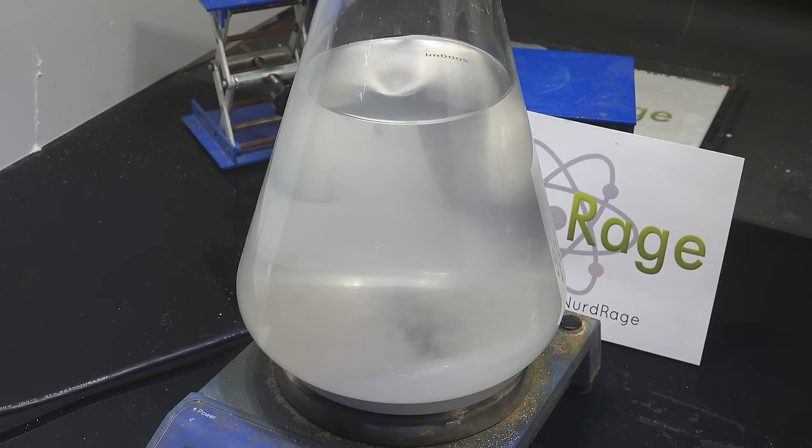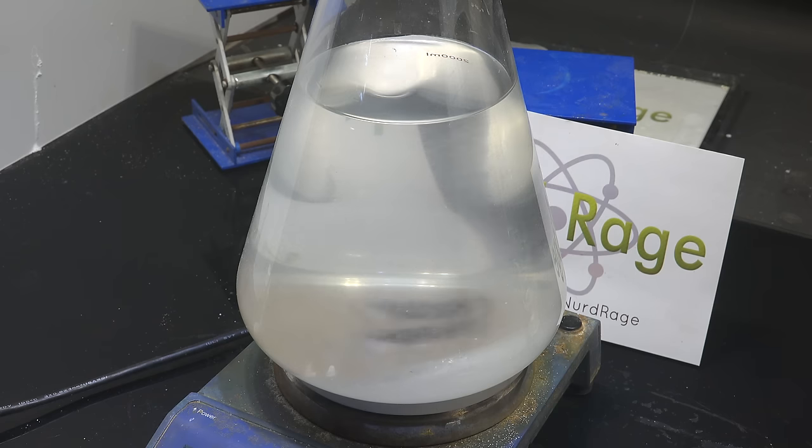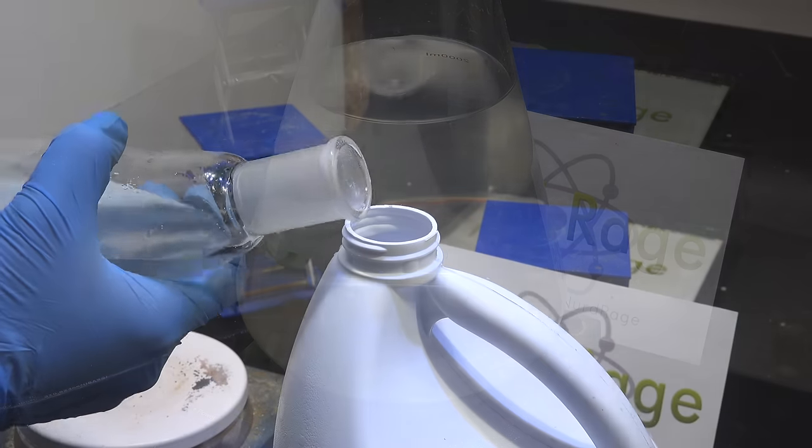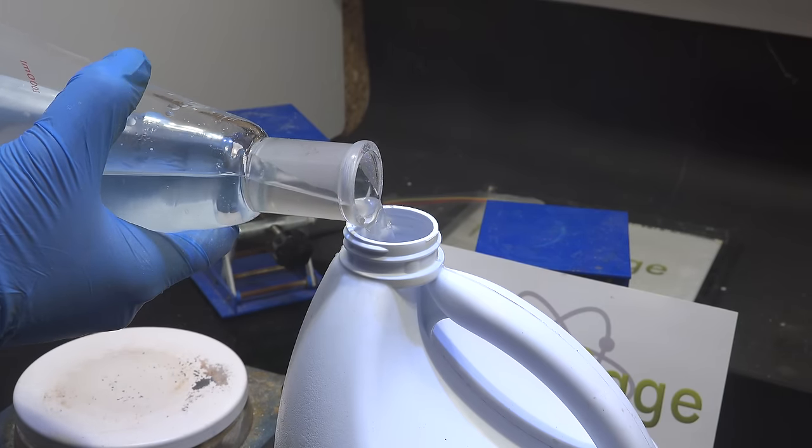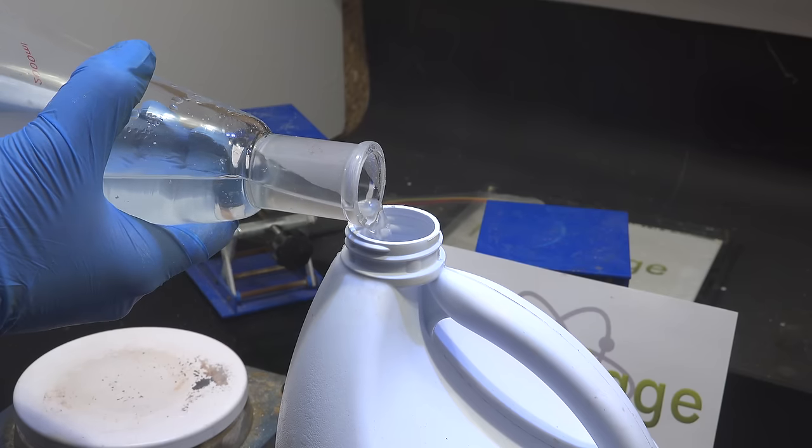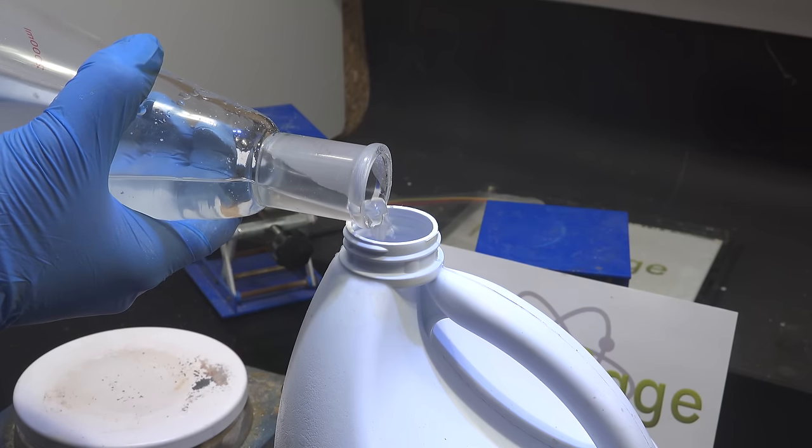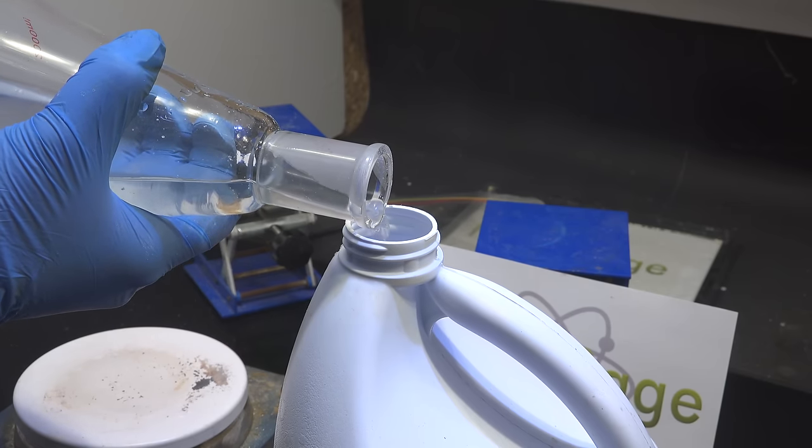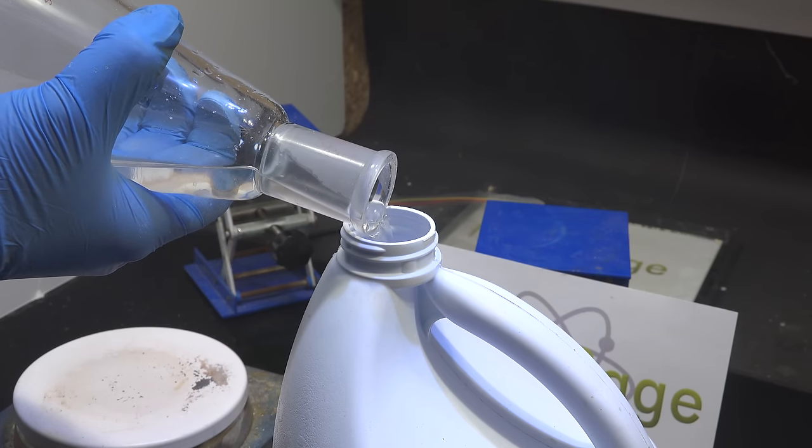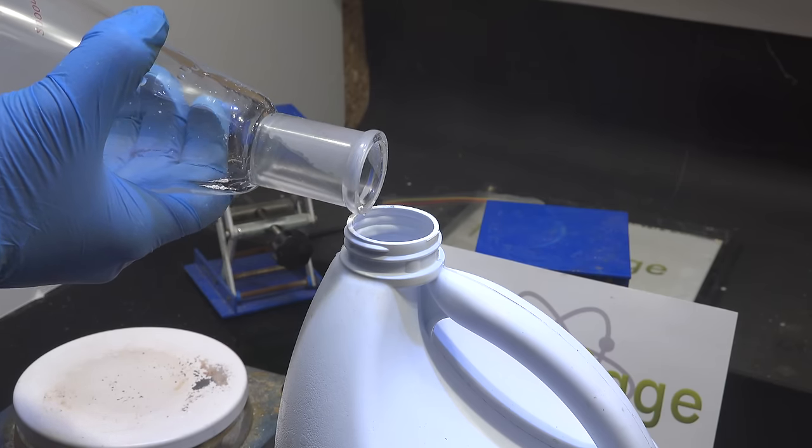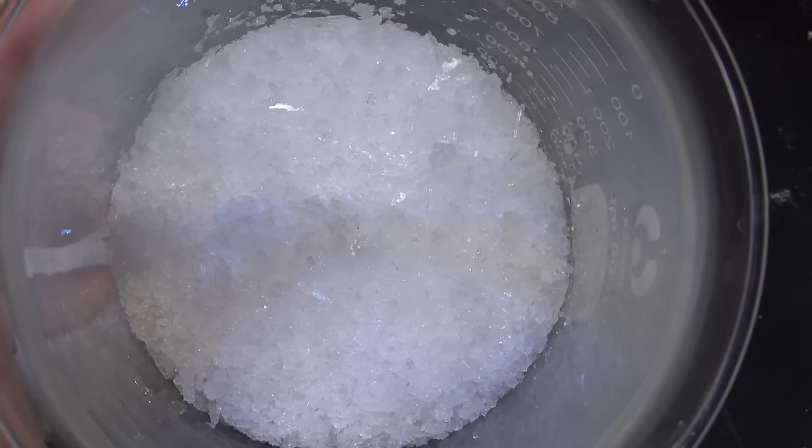And there it is, a small extra amount of potassium chlorate. It's not a huge amount so doing this treatment to maximize yield is optional. I'll let you decide if you want to do it or not. Now at this point I'm going to store my deplete solution for future runs of potassium chlorate. This solution still has potassium chloride and is saturated with potassium chlorate so I might as well keep it. I find empty bleach bottle is best for storage since they're designed to hold exactly this sort of highly corrosive oxidizing alkali. And there we have it, potassium chlorate.